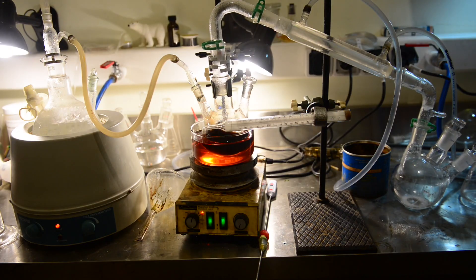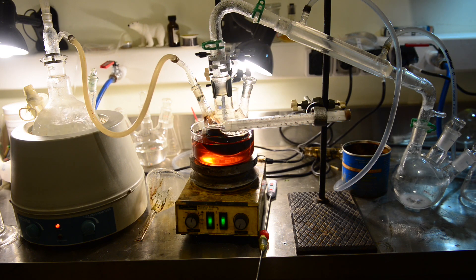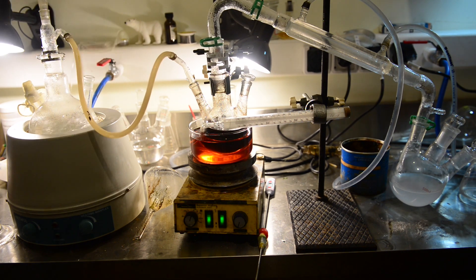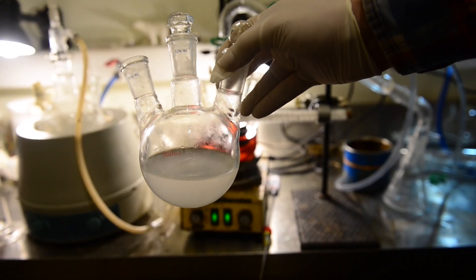We are monitoring the consistency of coming droplets meticulously. After collecting approximately 250 milliliters of liquid, no more oil droplets were observed in the fresh portions of the distillate. At this point we stop the distillation process.